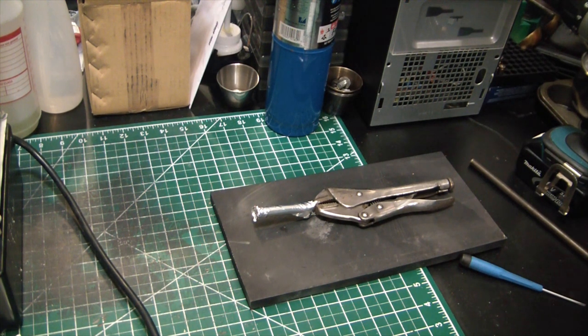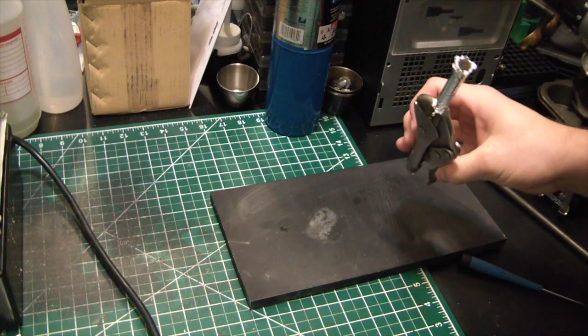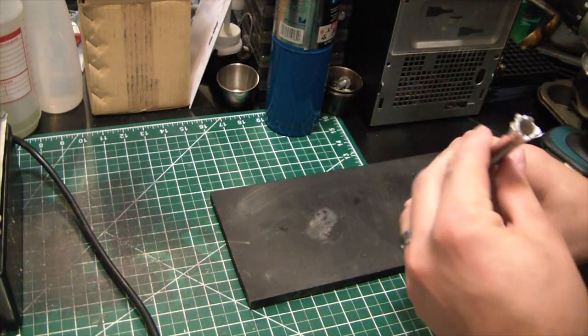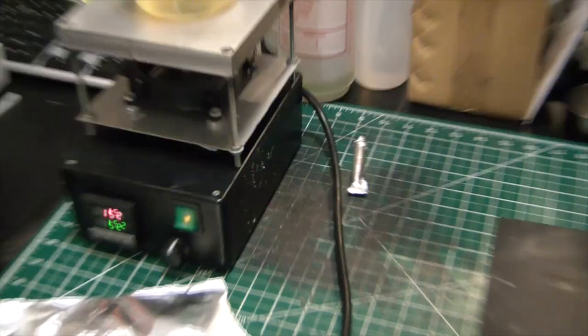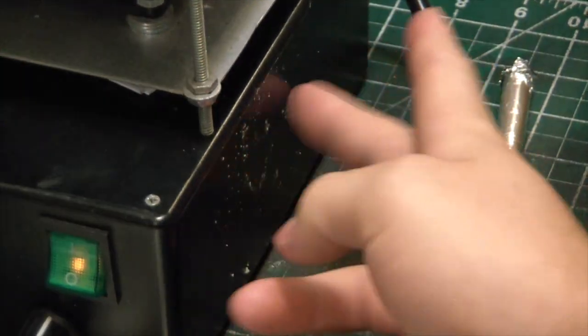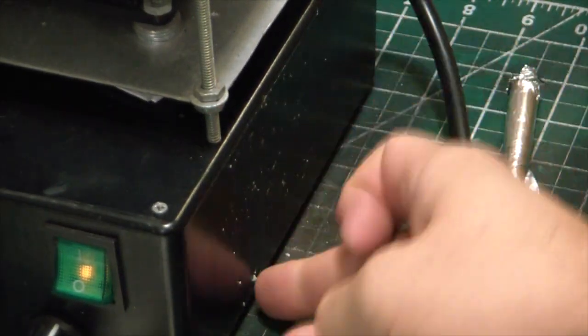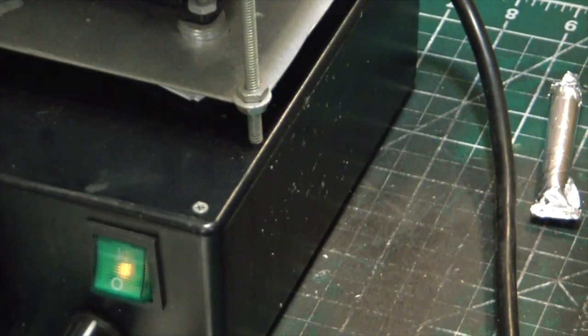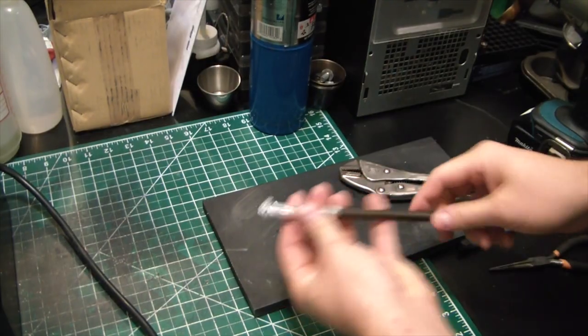Let's see what the hell this does. I'm gonna throw some goggles on, otherwise I might be losing an eye. We'll start with a lighter. Whoa! Holy fuck! Jesus! Oh, that was awesome. Scared the shit out of me but that was really cool. Oh my god, can't hear for shit. It shot some unburnt nitrocellulose onto the side of my home-built PID-controlled hot plate there. So I guess it wasn't fully pressurized enough for total complete combustion.